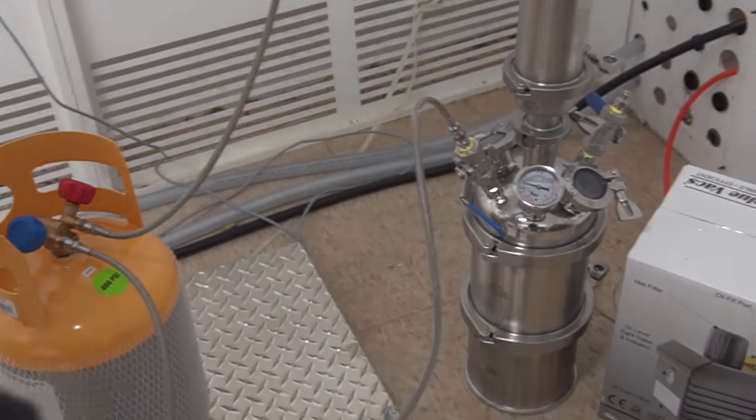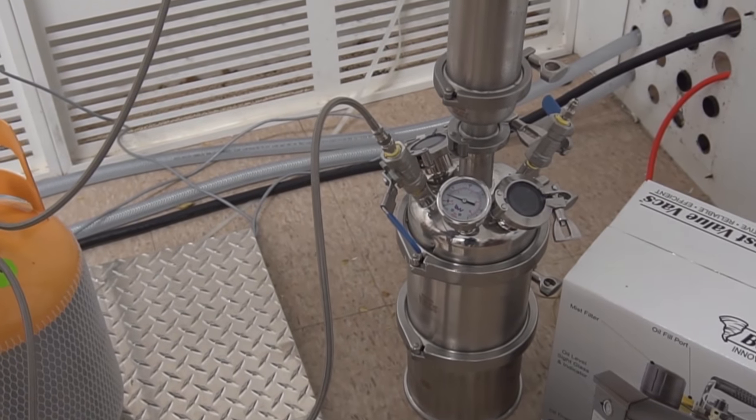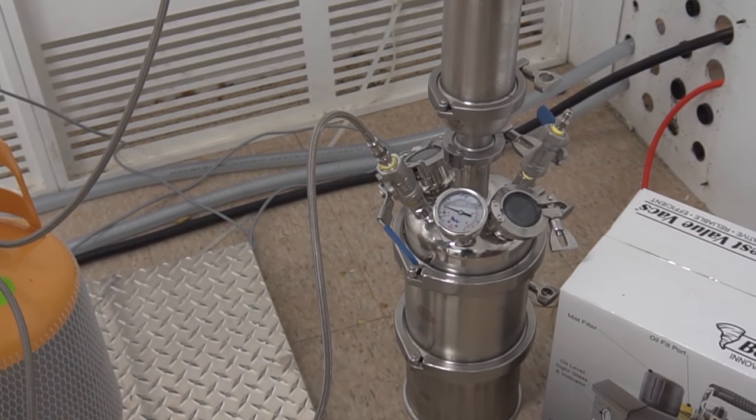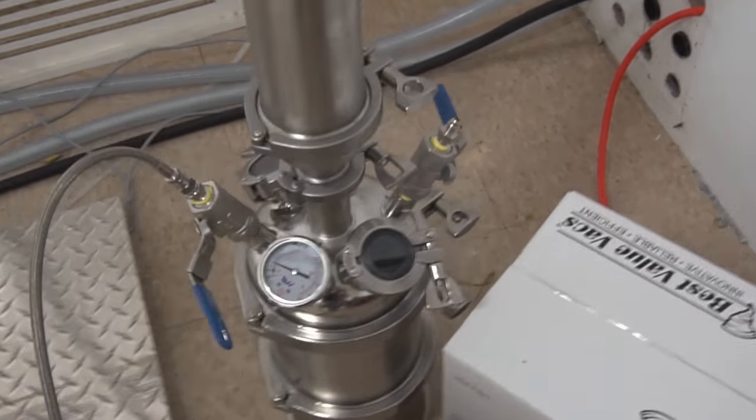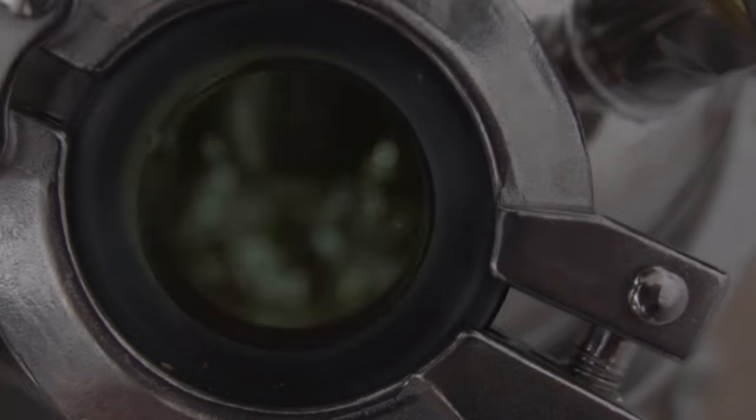So there you go. That's how you run an extractor. All the oil has been pushed through. We're going to get a little look inside the sight glass here. You can see that our oil resin is a mixture of our oil with butane still in it.